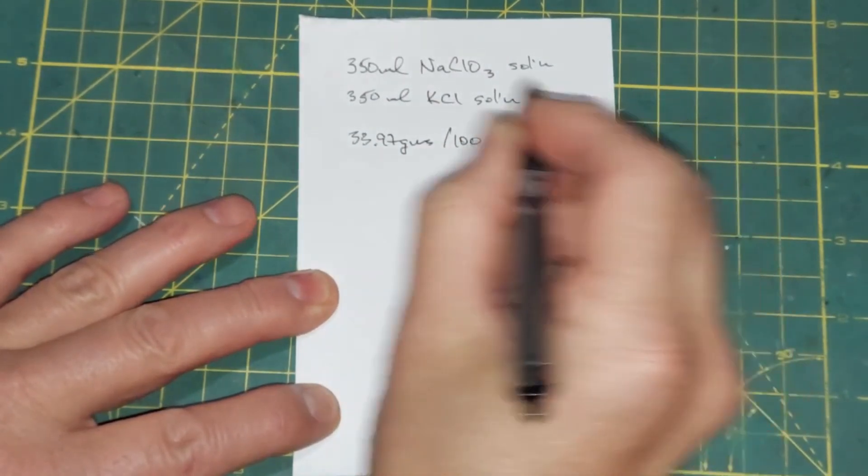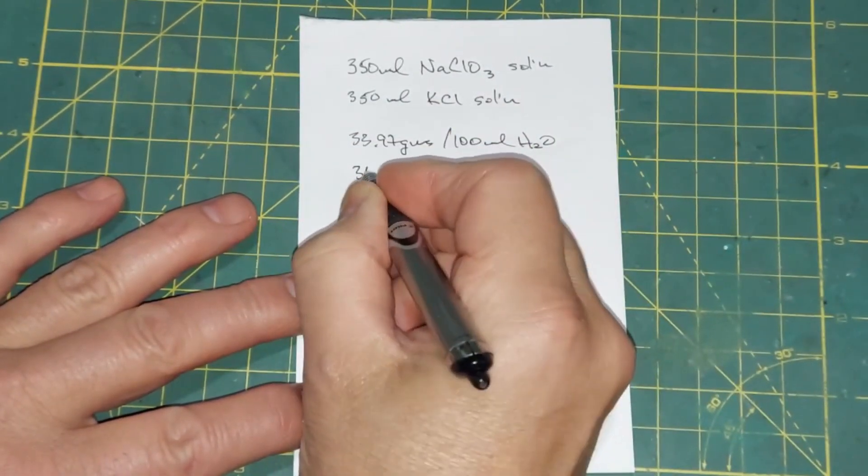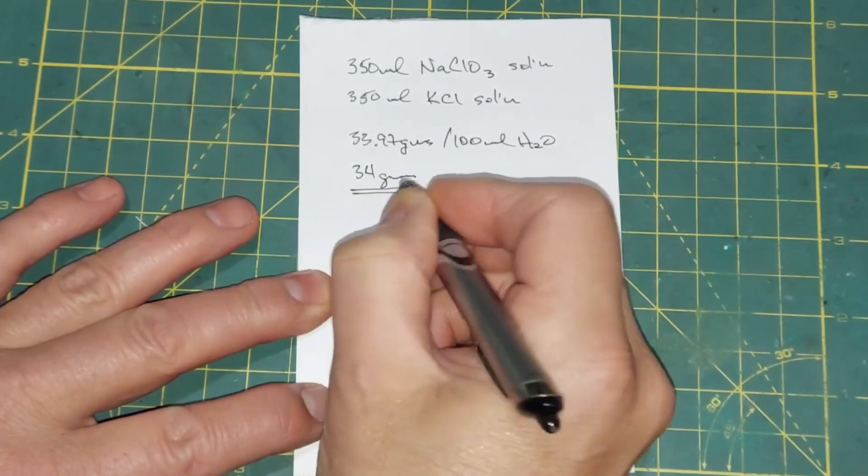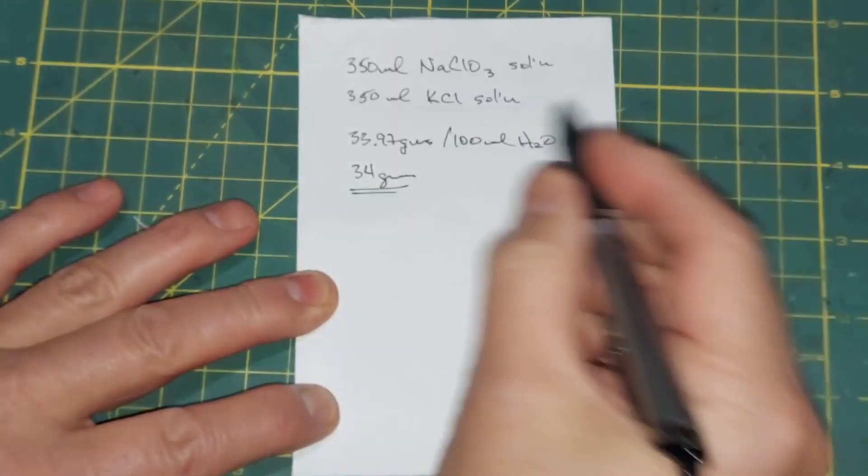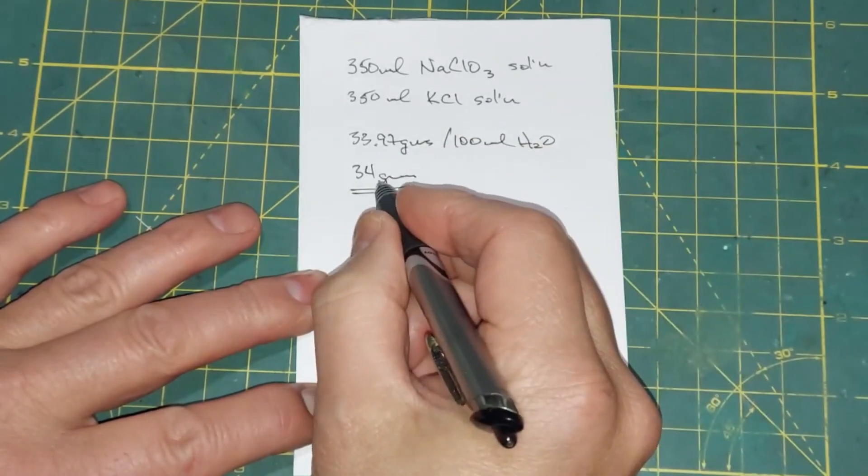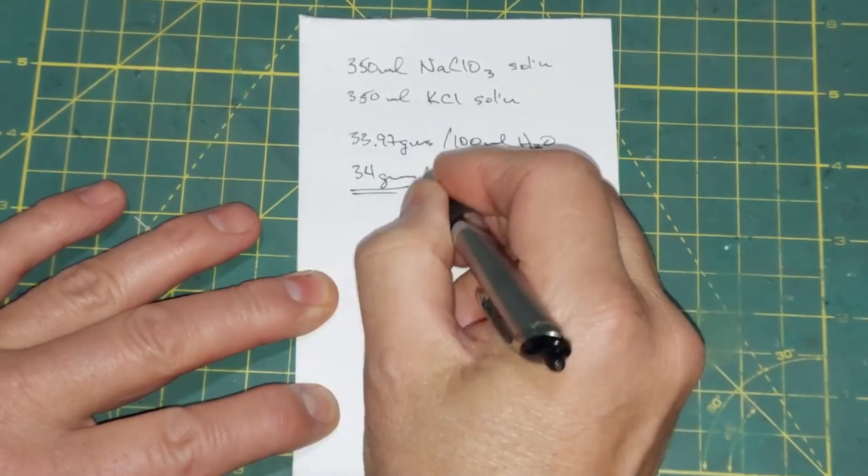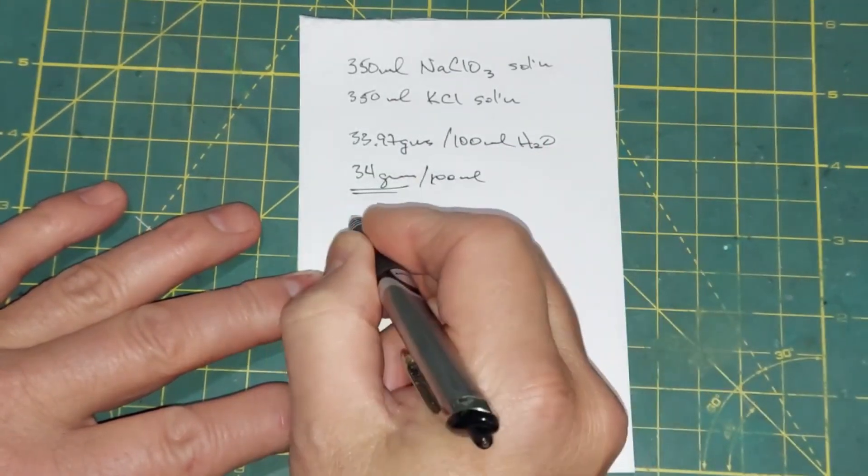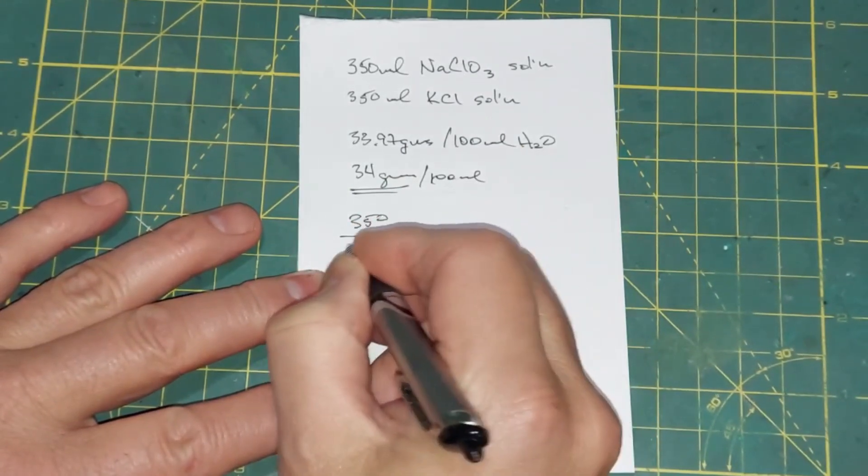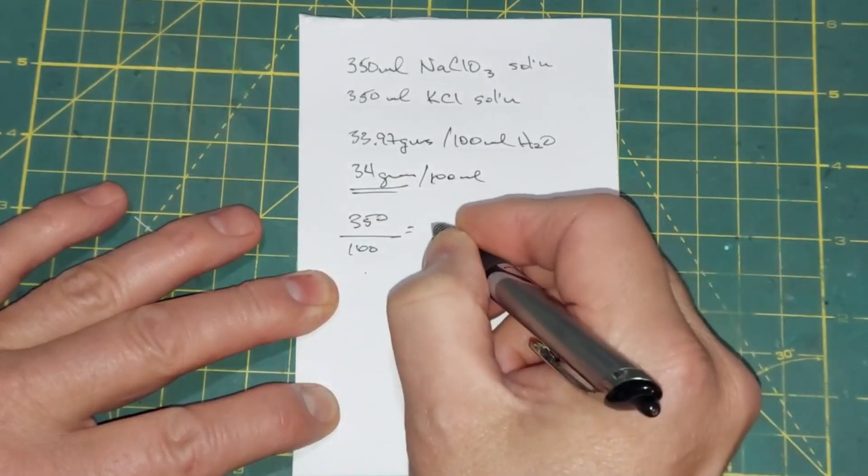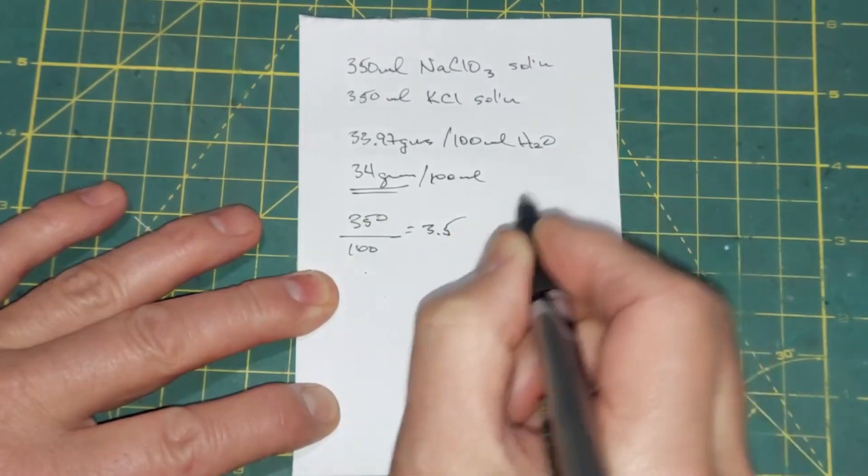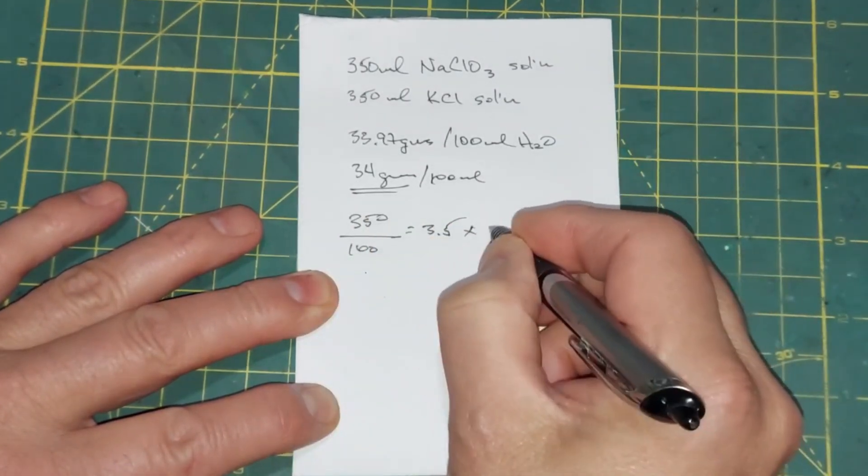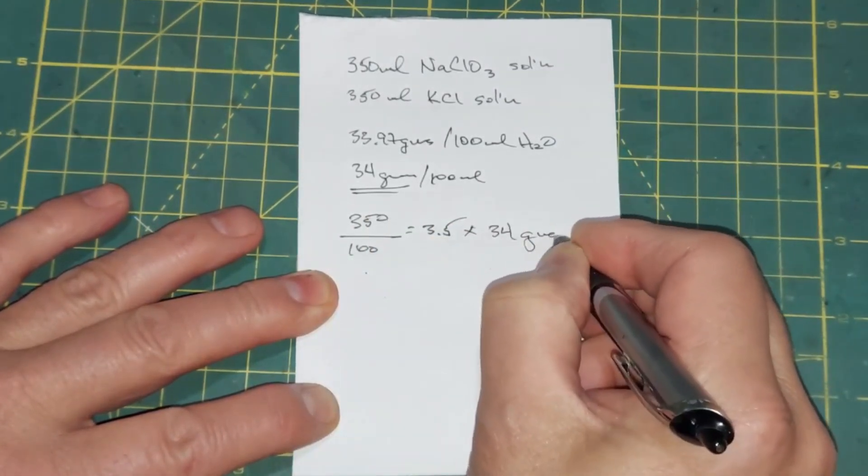So we have 350 milliliters we need to make. We have 34 grams, and that's per 100 milliliters again. So if we take the 350, divide it by 100, we get 3.5, and that's what we need to multiply by our 34 grams of KCl here.